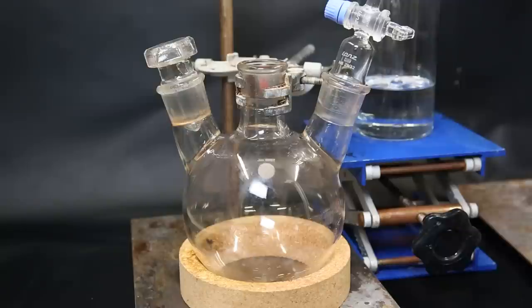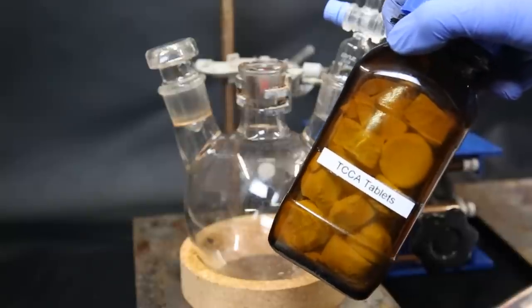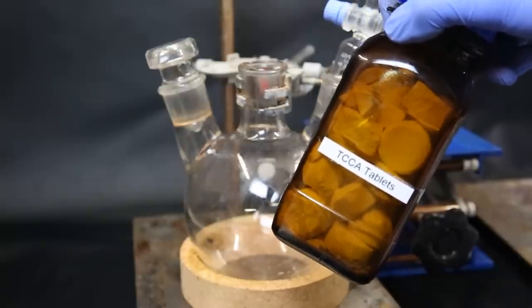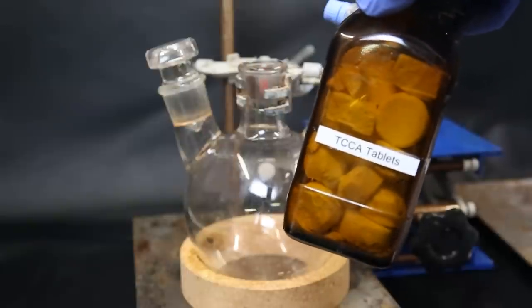Now I set up the chlorine production part of the setup. So I have set up a flask with a stopper and a gas adapter. To produce the chlorine, I will use TCCA and hydrochloric acid. The cheapest source of TCCA is pool chlorine tablets, which are pretty much pure TCCA.